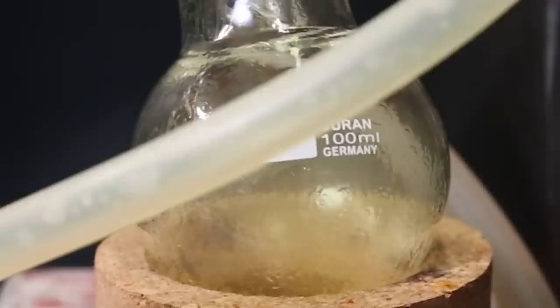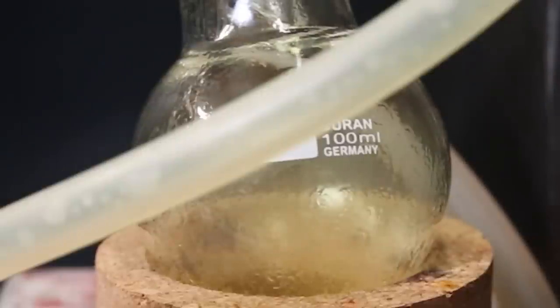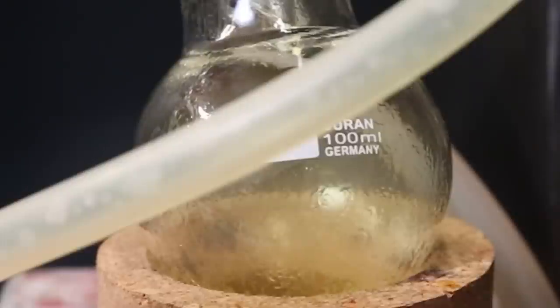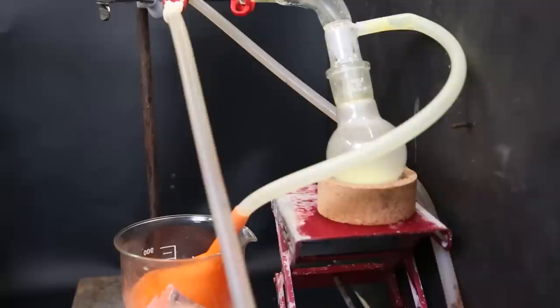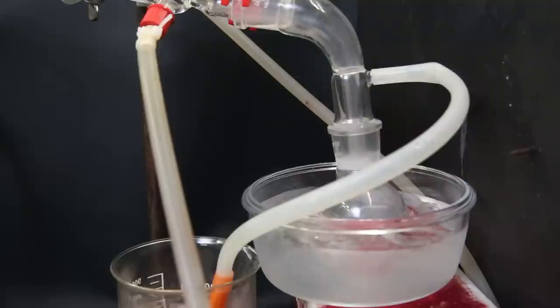In the receiving flask, the arsenic 3 chloride is steadily coming in. Since this was the first time I'm doing this, something had to go wrong. So through suckback, some of the solution from the trap got sucked into the receiving flask. Luckily, it doesn't really matter, since I was making more than I needed anyway. So because of this, I lost about half of the arsenic 3 chloride. I just swapped the adapter and the receiving flask, and also put an ice bath underneath to condense more vapors.